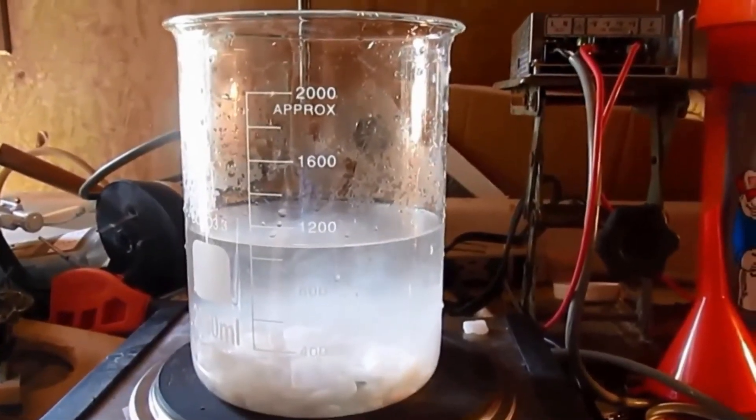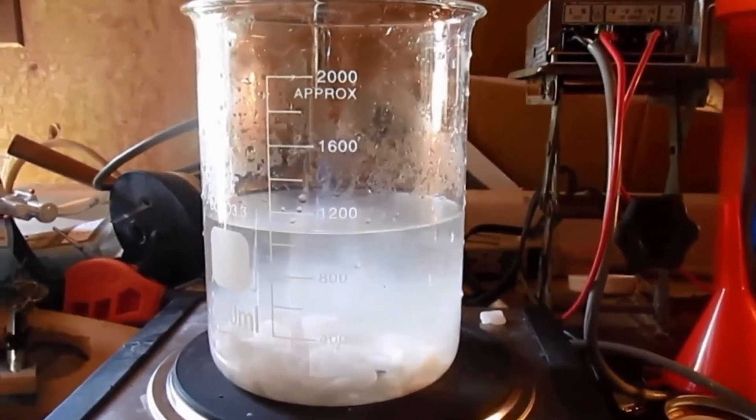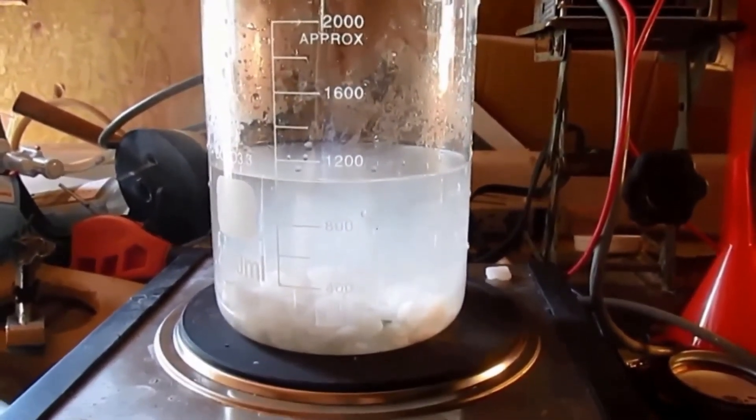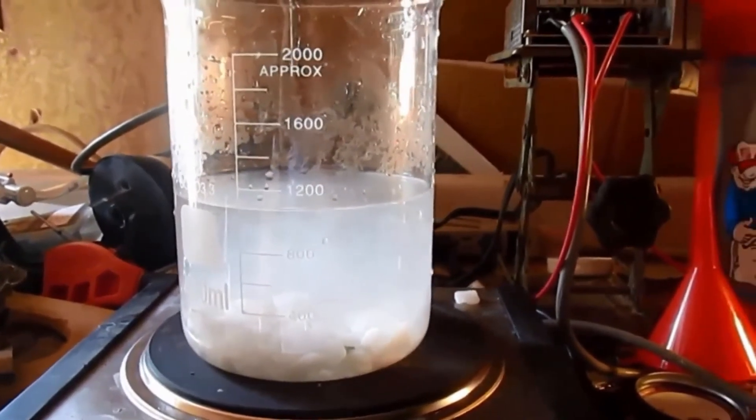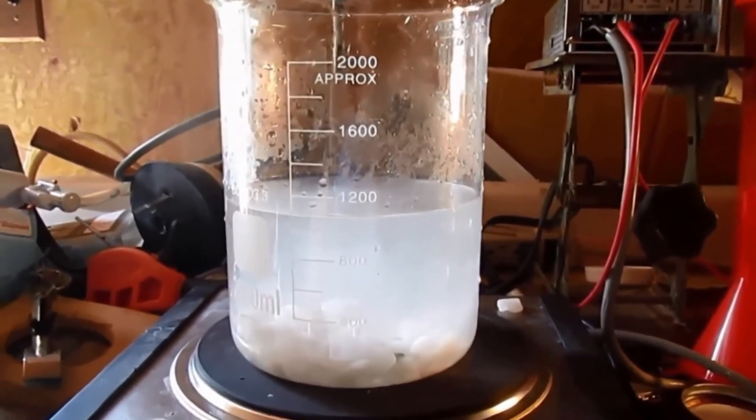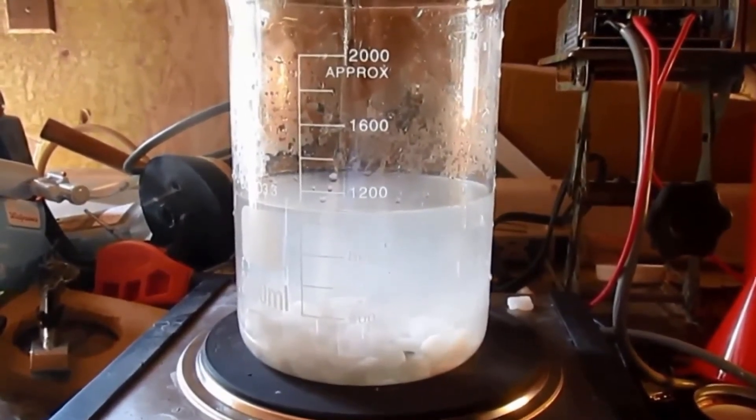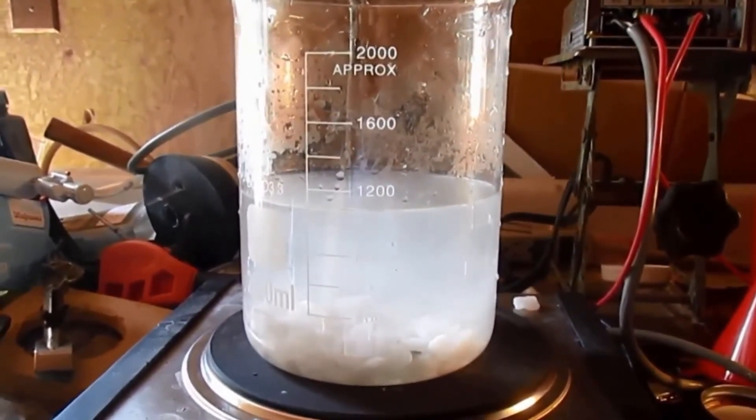After boiling for about 45 minutes, the next step is to prepare a saturated solution of potassium chloride. Using a hot plate, heat the solution to help with the solubility of the potassium chloride.